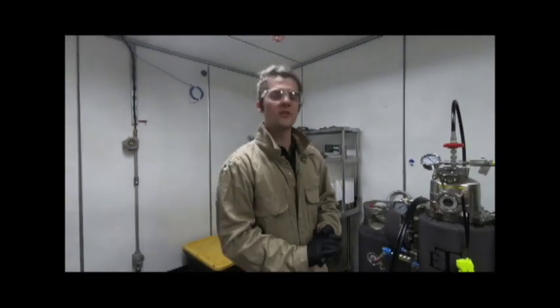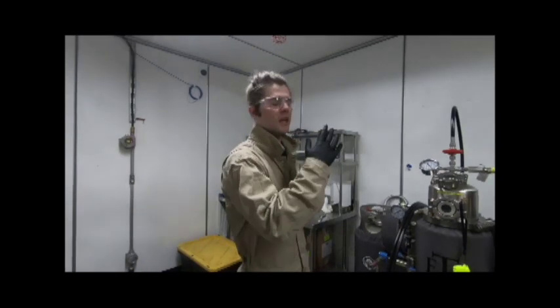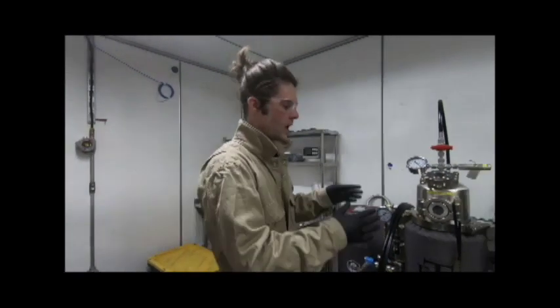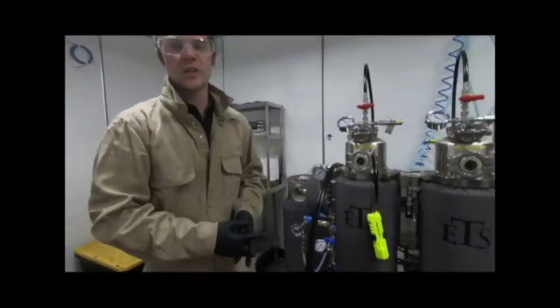Hello, my name is Grim, and today we are going to be explaining the extraction process on the MUP Modular Extraction Platform.